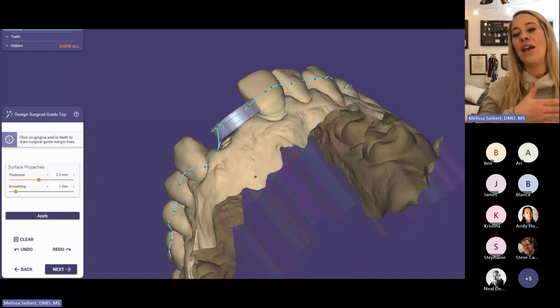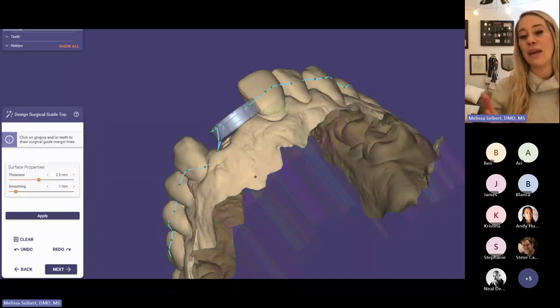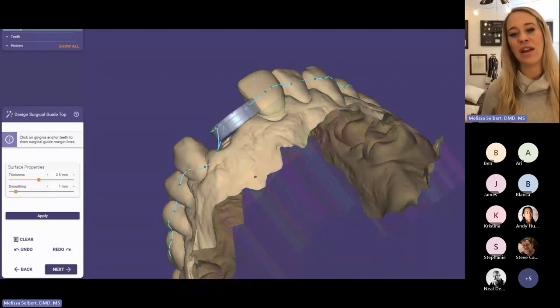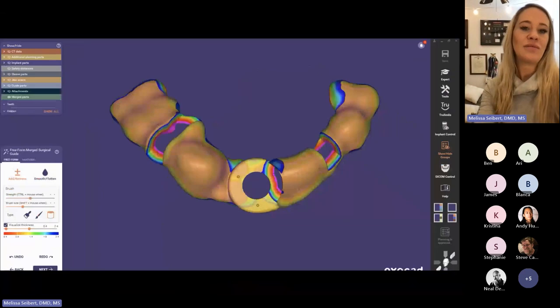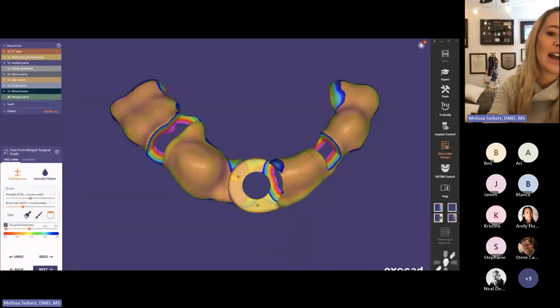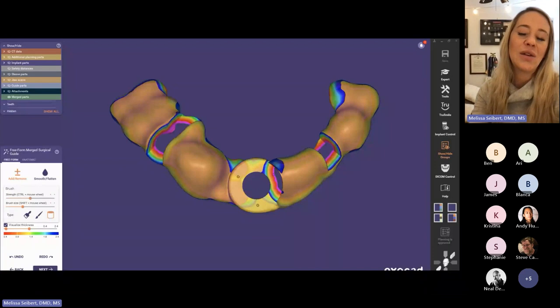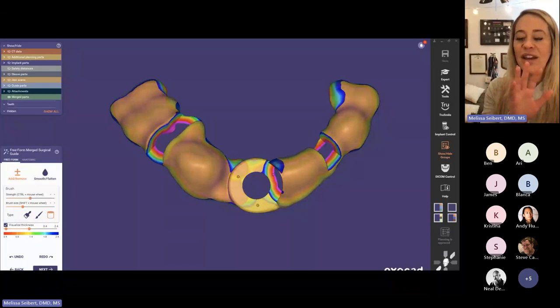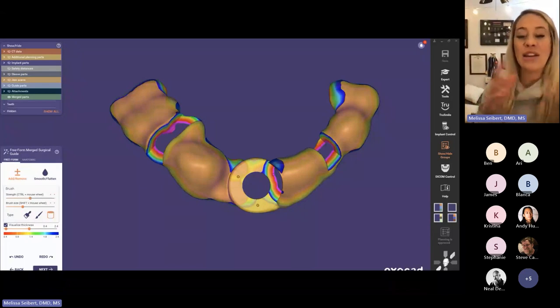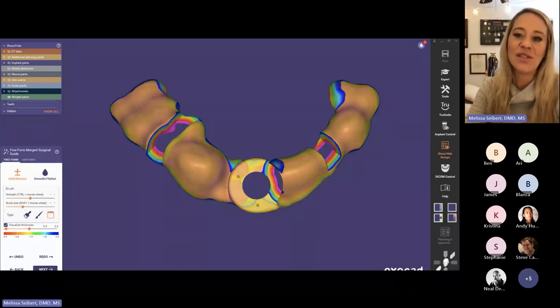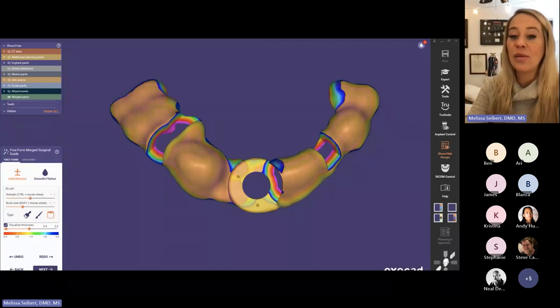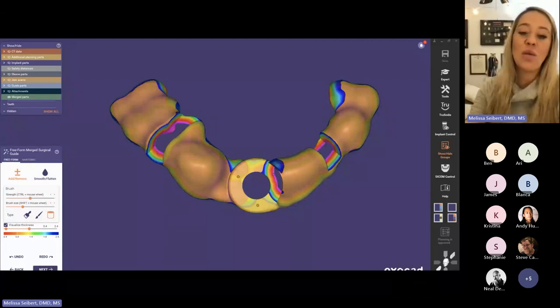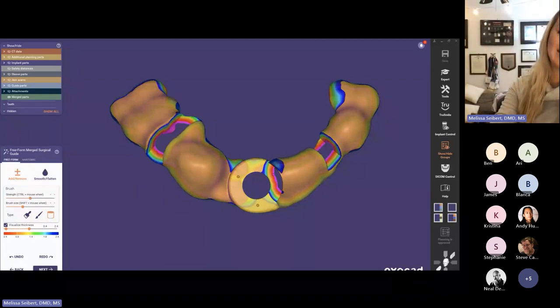With other softwares, I've had to manually go back and adjust my guide or get creative, which isn't really the end of the world. But it's nice that this feature exists. Here's the final guide before being printed. The way I adjusted it is actually very similar to how I would adjust a pontic tooth in ExoCAD — using the add, remove, and smooth features. Here's my final guide. I was also able to put windows in it, which most softwares allow, and which is really important so you can fully verify that the guide is properly seated.